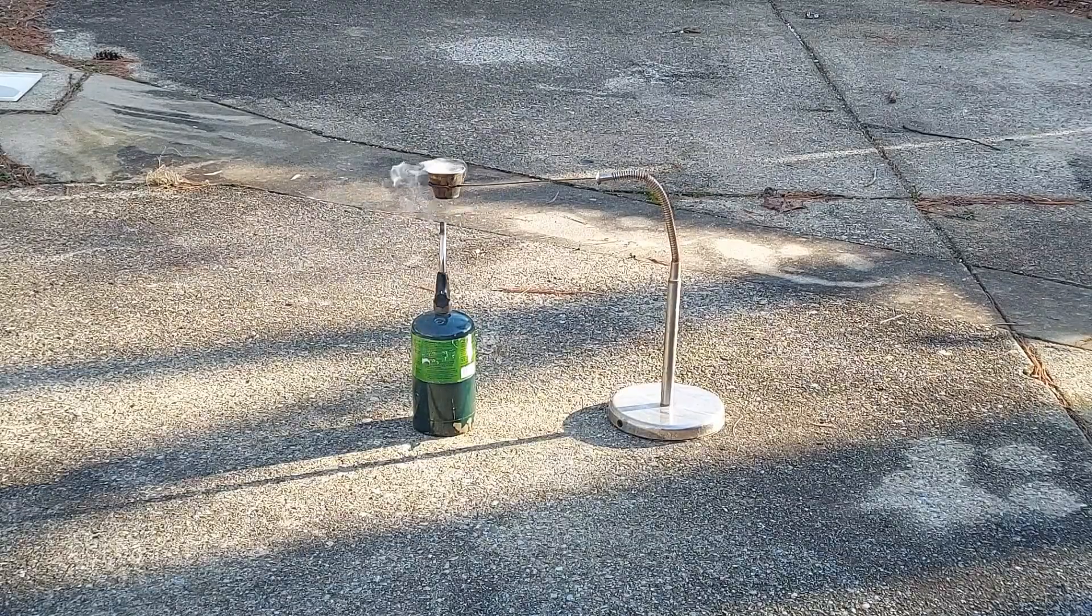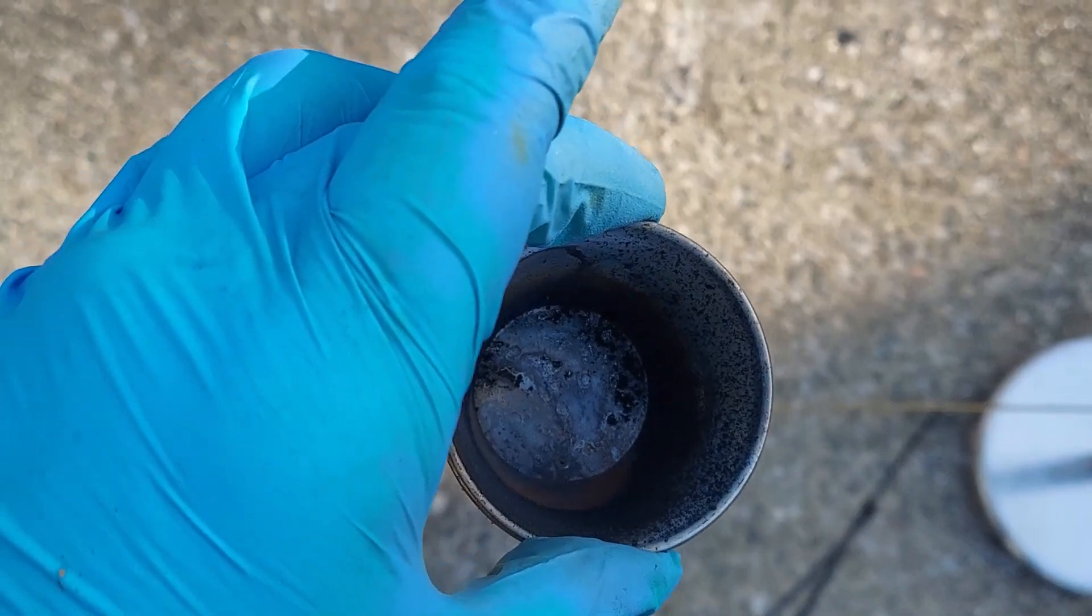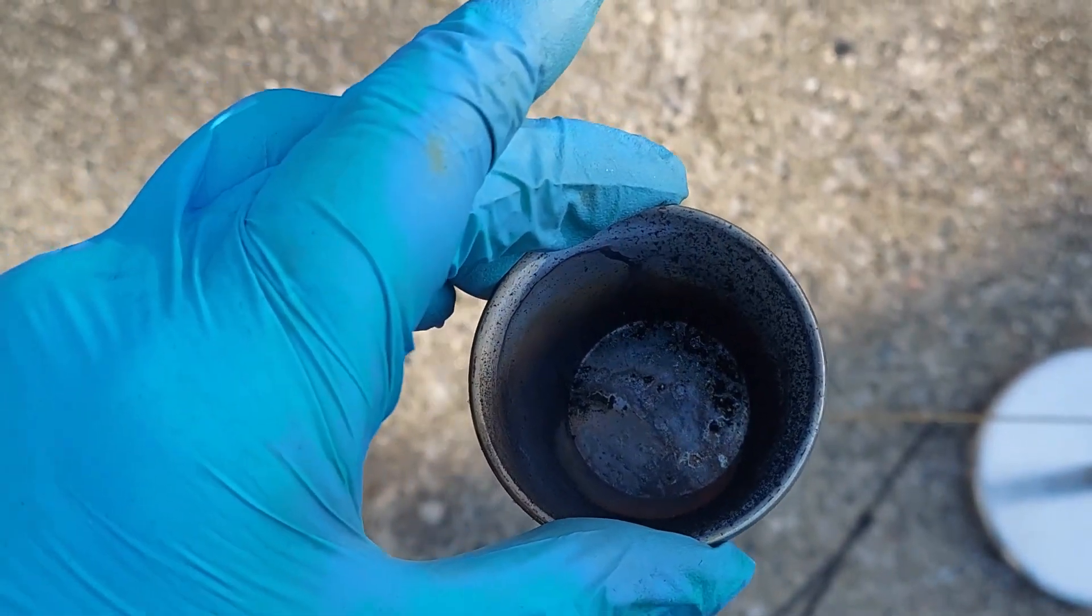Okay, that ends this experiment. It just burned obviously.